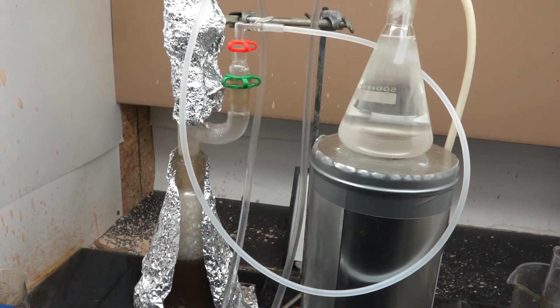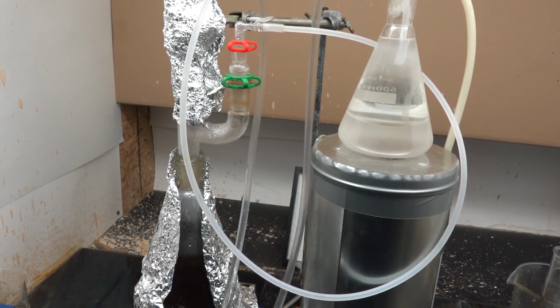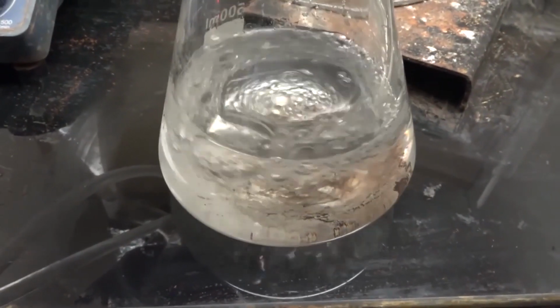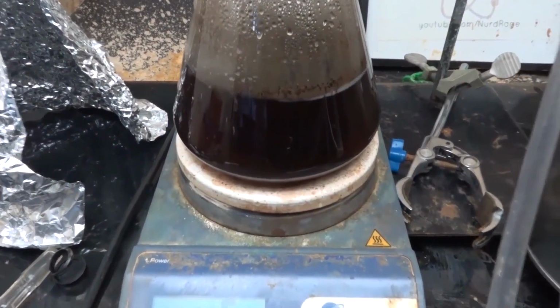Now you might be wondering, if we originally made the chlorotoluene sulfonate by sulfonation and removing water, wouldn't adding the water back in hydrolyze it and thus reverse the process, completely destroying our progress? You're absolutely right, and this would happen at higher temperatures. But since we add so much water, the mixture is boiling and thus maintaining a lower temperature at about the boiling point of water. At this lower temperature, we can take advantage of azeotropic distillation without worrying about the reverse reaction. Here is our chlorotoluenes, and I've decanted most of the water. This mixture is enriched in para-chlorotoluene isomers and depleted in orthochlorotoluenes. The residue back here contains our orthochlorotoluene sulfonate and some water.